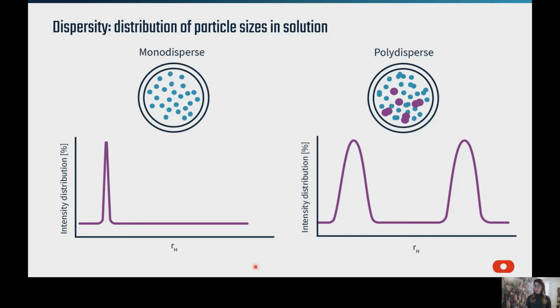So you heard me mention mono and polydispersed systems in the previous slide. For a monodispersed system, shown in the example on the left, the particles in solution are a single size. They're very homogeneous. And we can see in the intensity distribution plot that there's a single peak, which corresponds to the single particle species with its corresponding radius. And the peak is very sharp and narrow, indicating that there's a tight distribution about the mean. Whereas the polydispersed system includes a variety of different particle sizes. In this example, we see in the intensity distribution plot two peaks corresponding to two different particle species with two different radii. And these peaks are relatively broad, which indicates that those particle populations are both polydispersed or heterogeneous.